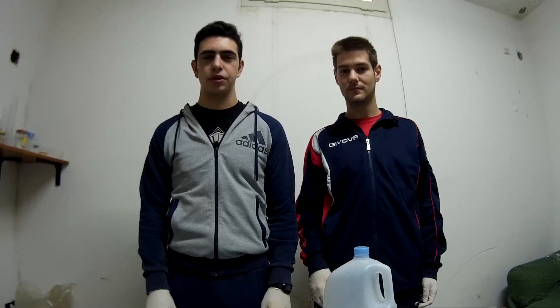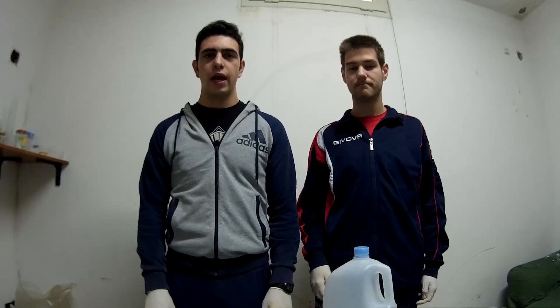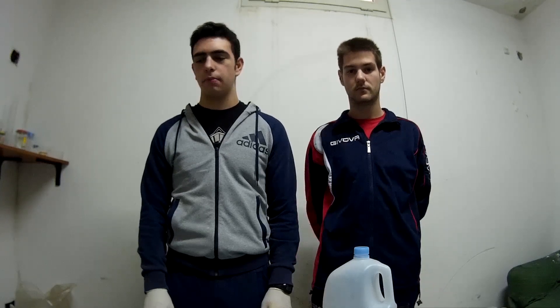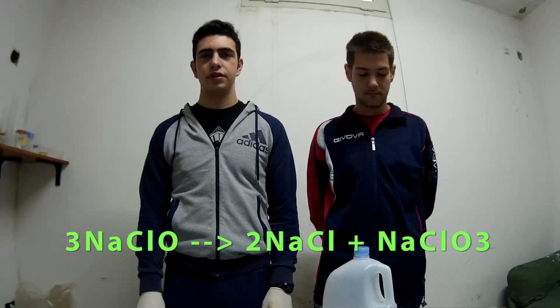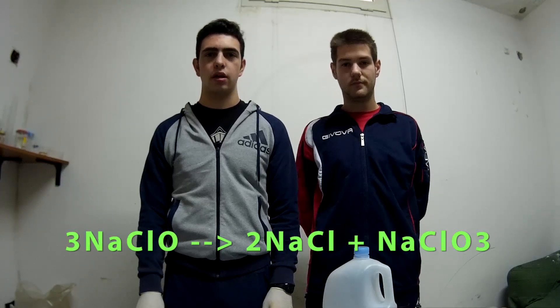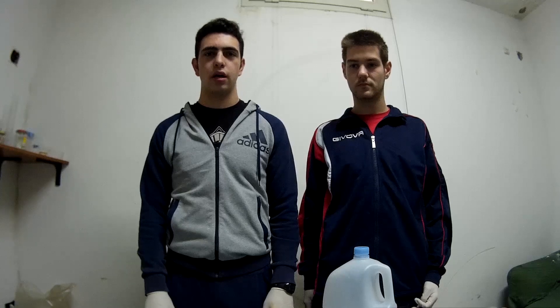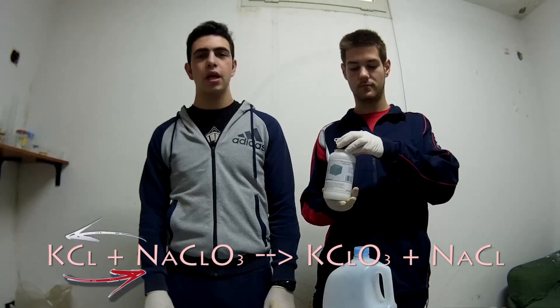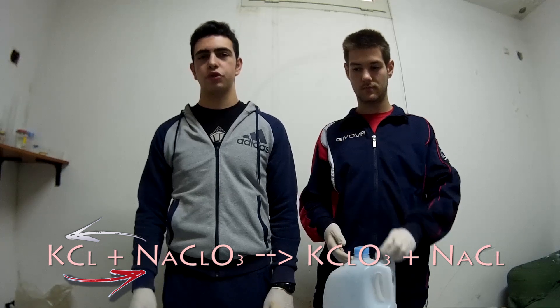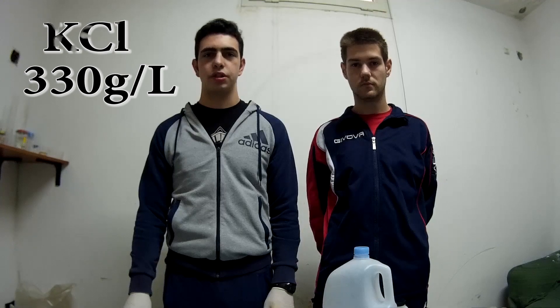The first one is the disproportionation reaction of sodium hypochlorite, and we will carry out this reaction by boiling the bleach. The second reaction is between a concentrated solution of potassium chloride and the concentrated solution obtained by boiling the bleach.